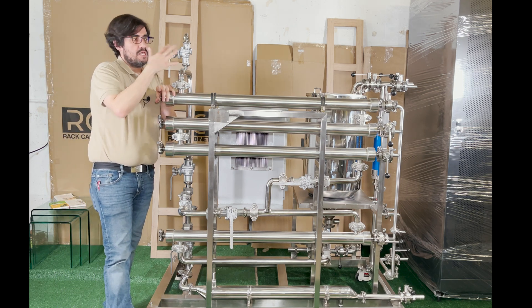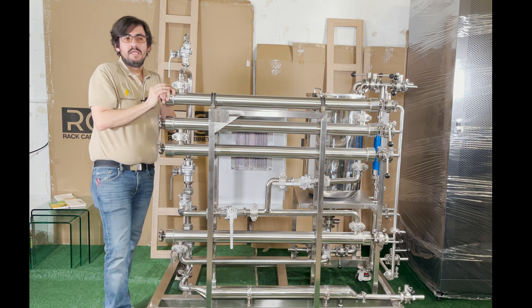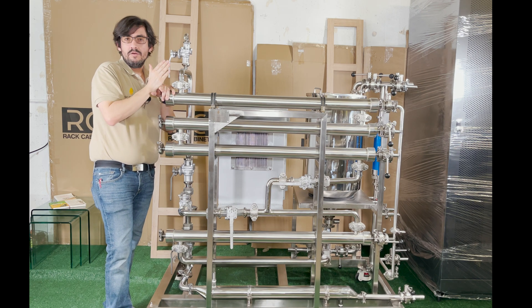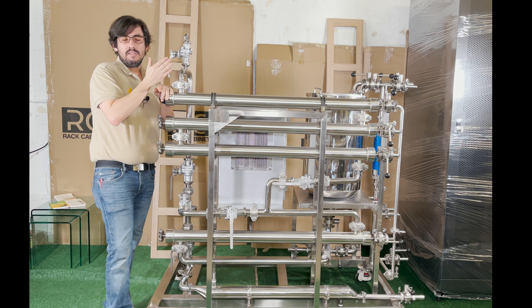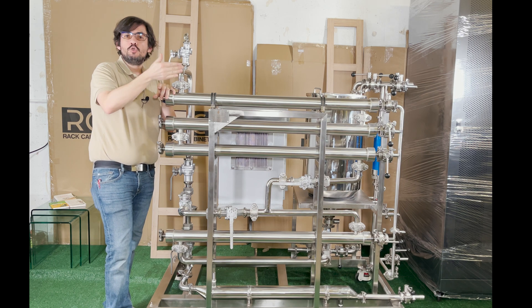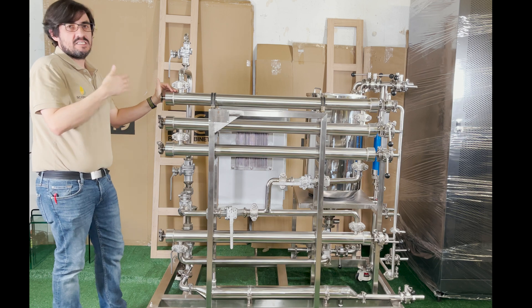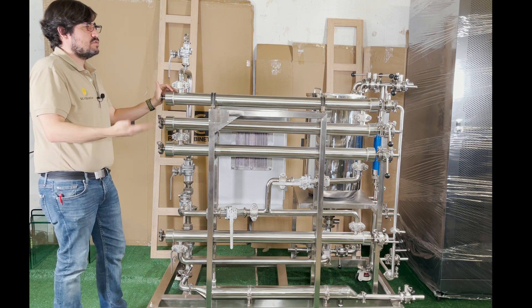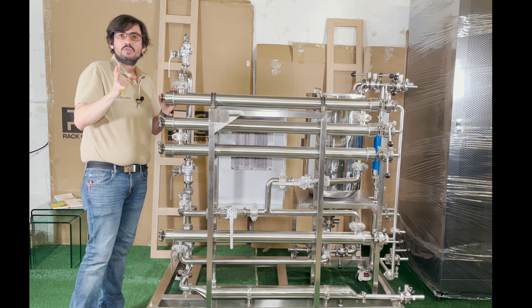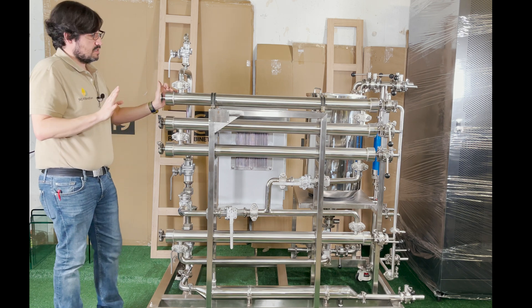Parallel filtration for nanofiltration — you see this a lot in reverse osmosis systems where the water flows in parallel but gets filtered two or three times, typically three times for something like a desalination plant. But since our application is so small, what we do is filter in series.